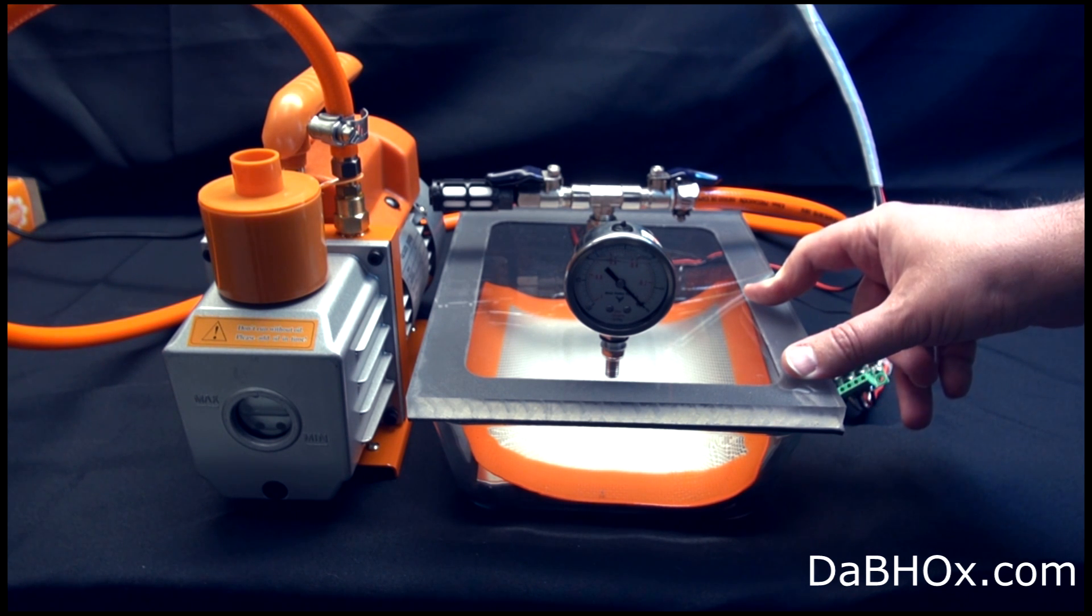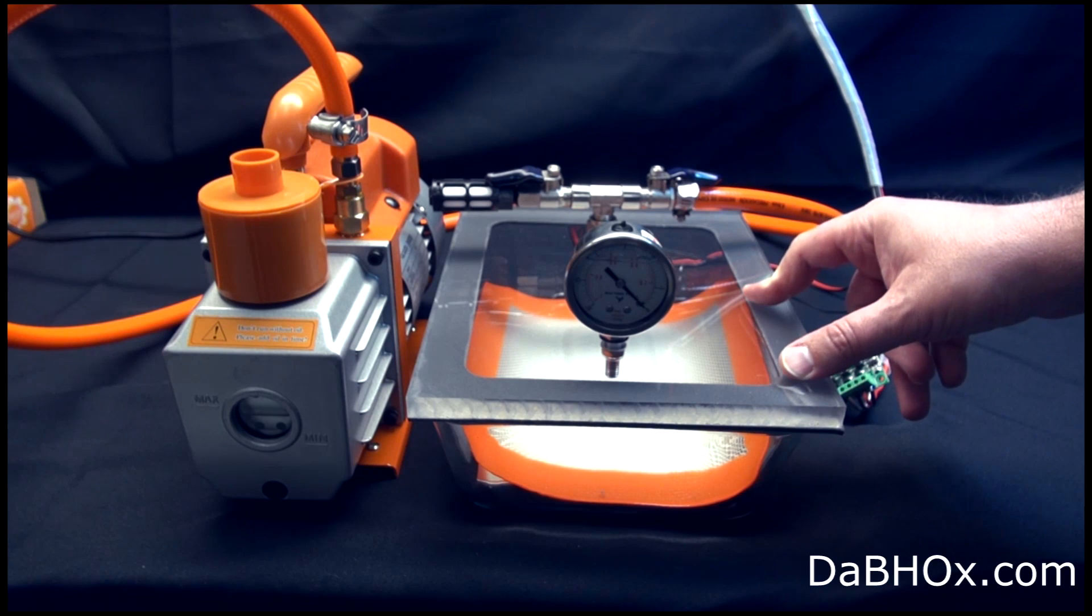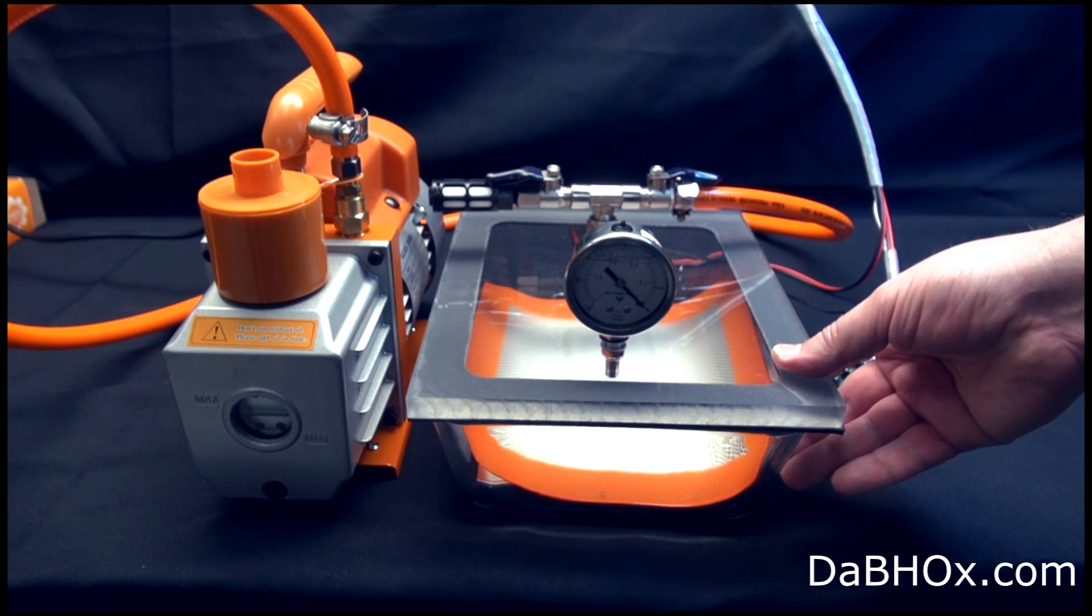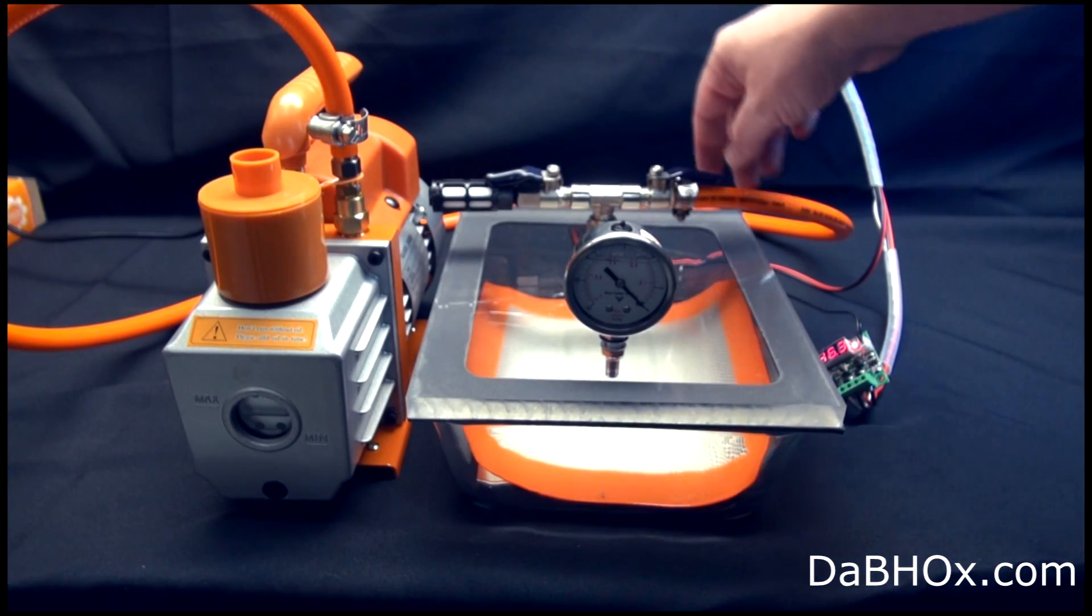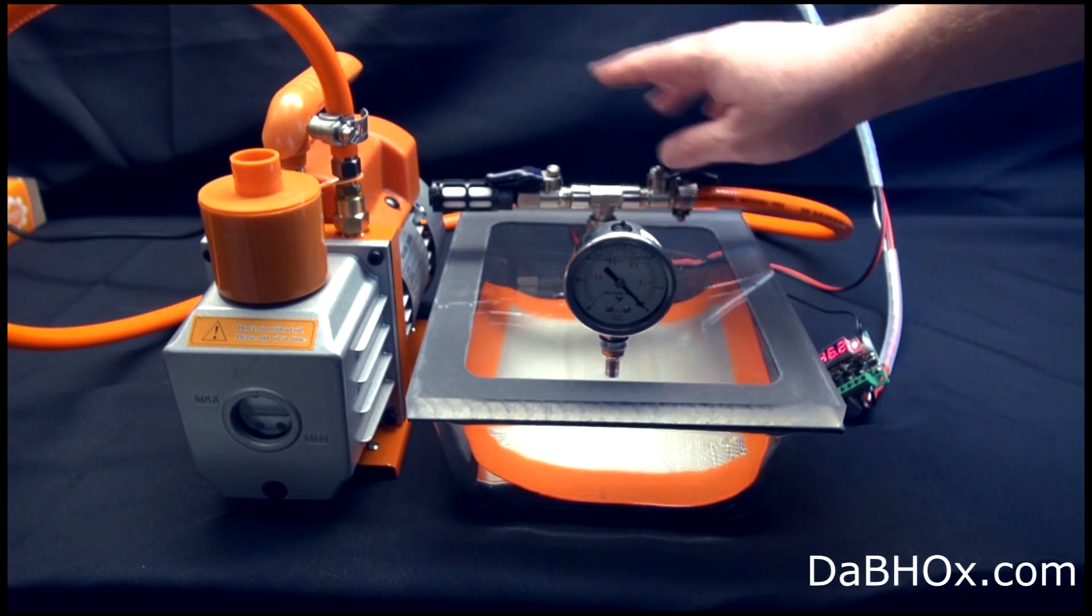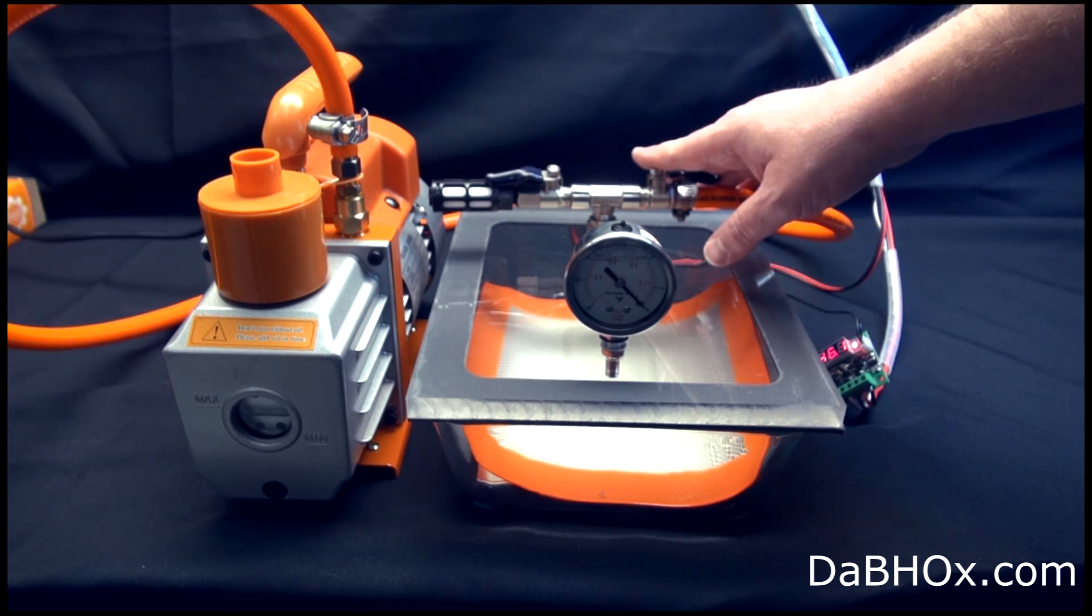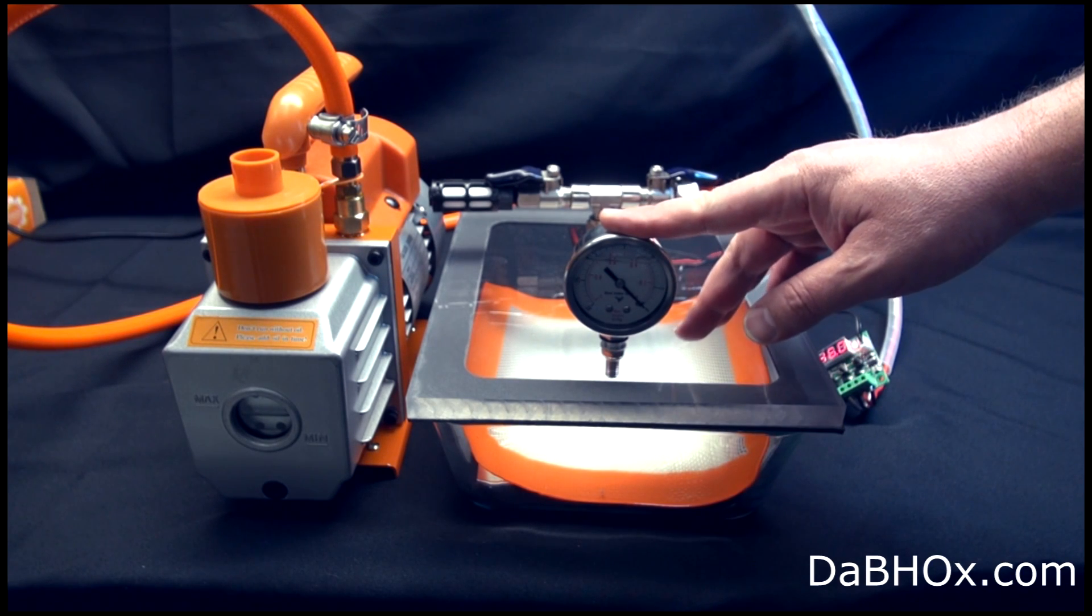Now to the operation of the unit. Again it's very simple. You pretty much have the vacuum chamber, glass vacuum chamber, the pump that's going to get connected with quick connect. You have vacuum pump, vacuum air valves and vacuum valves, and you have vacuum meter over here.